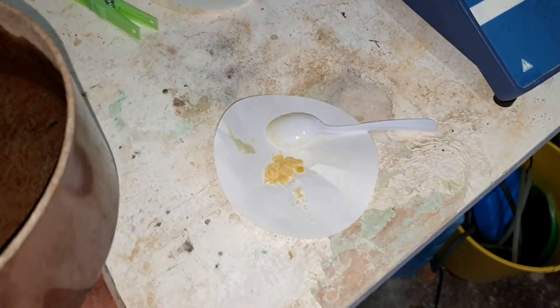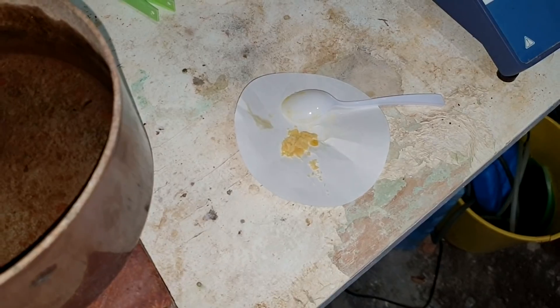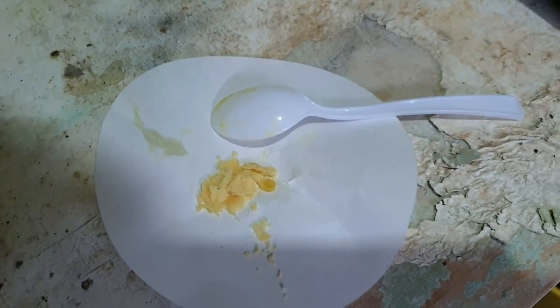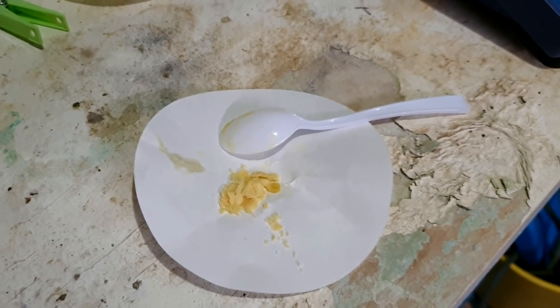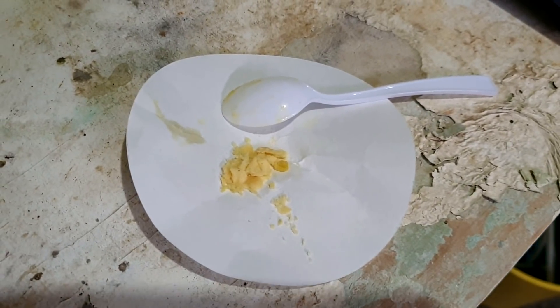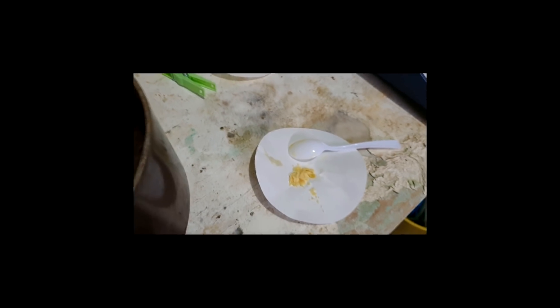Here's our final product. I had a tough time filtering it because there were a lot of crystals relative to solution — the solution was very thick so it didn't get drawn off the crystals very easily. This product is still triggering the yellow sensors. It deserves a recrystallization, but we're doing a heat test first. We're waiting to see if it melts and explodes — if it does, we'll give it the recrystallization it deserves. If it doesn't, we'll throw it in the bin and have a cry.